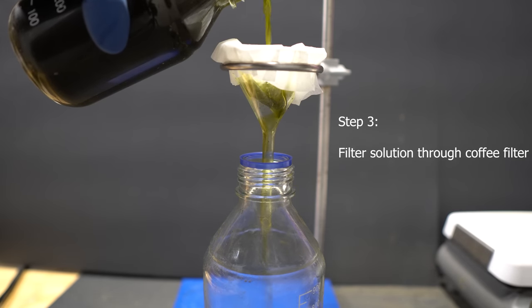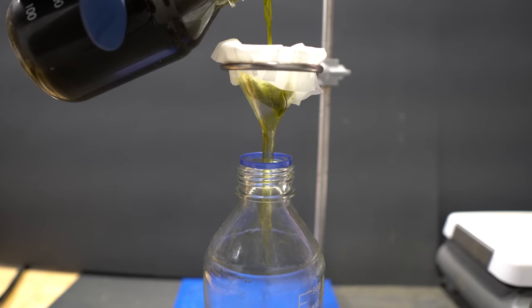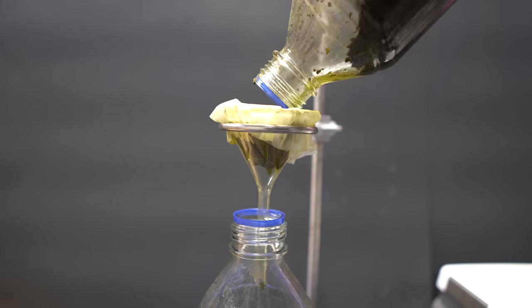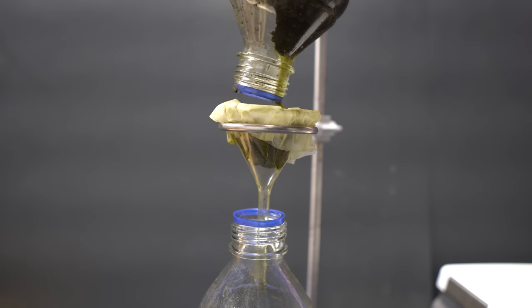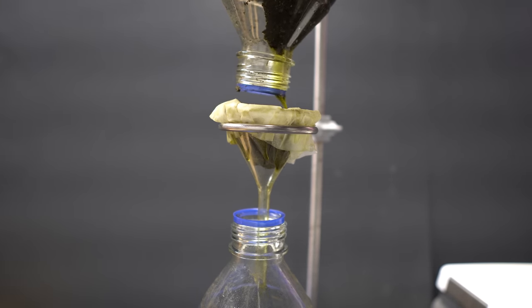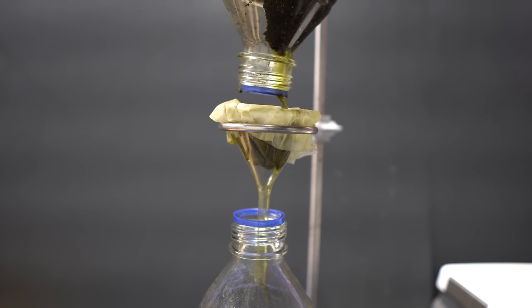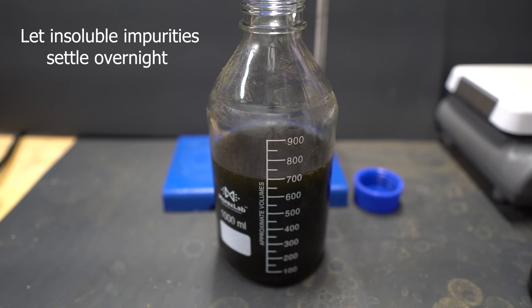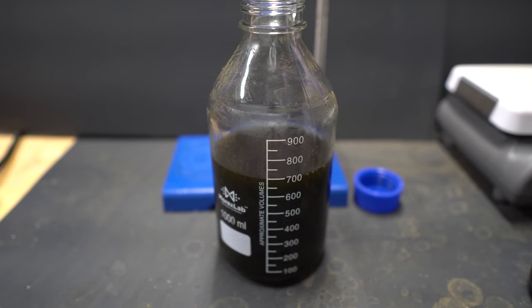The total amount of solvent that I ended up with was around 700 milliliters. The next step is to filter through a coffee filter just so we can reduce the bigger insoluble impurities and any big particles. The good thing about these bottles is they have a small neck and I can just hold the bottle upside down and let all the acetone fall into the filter.